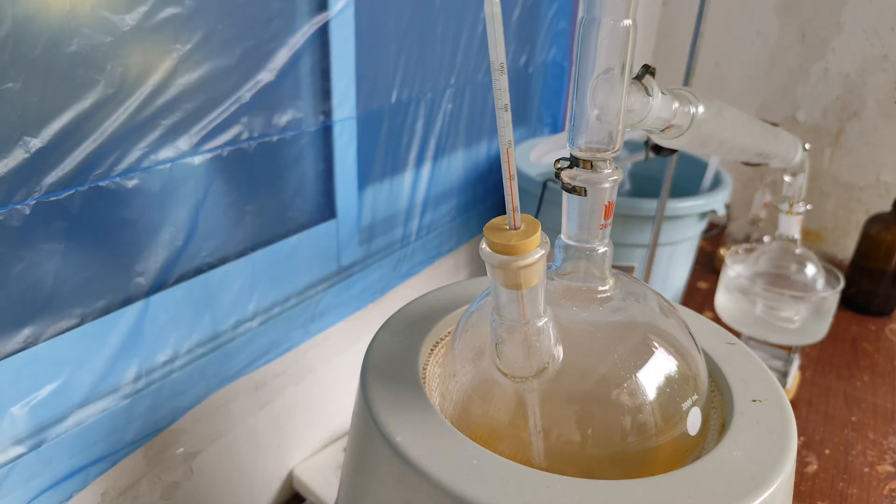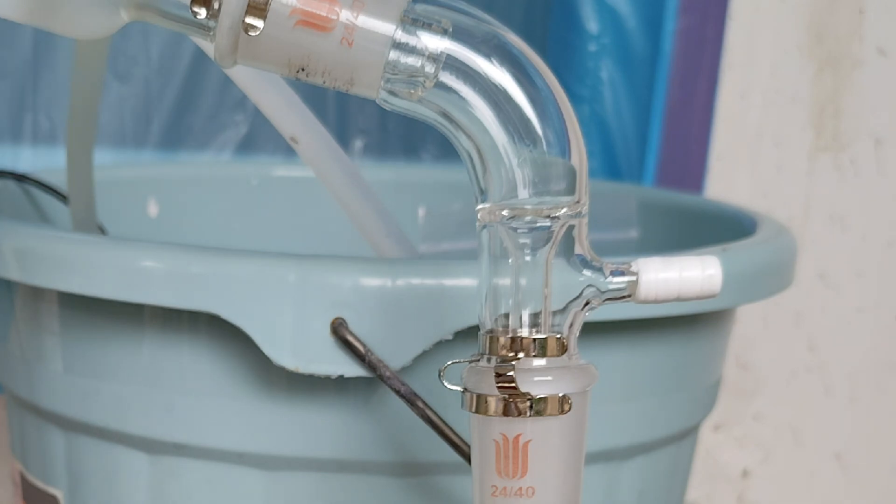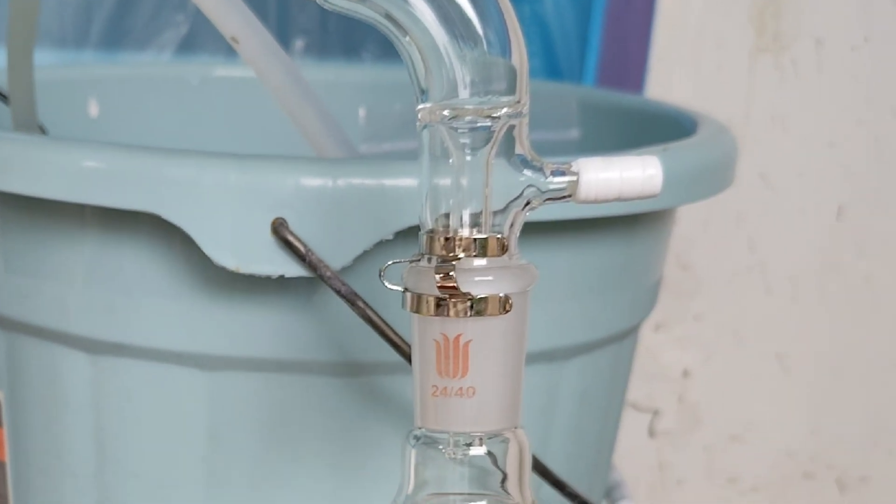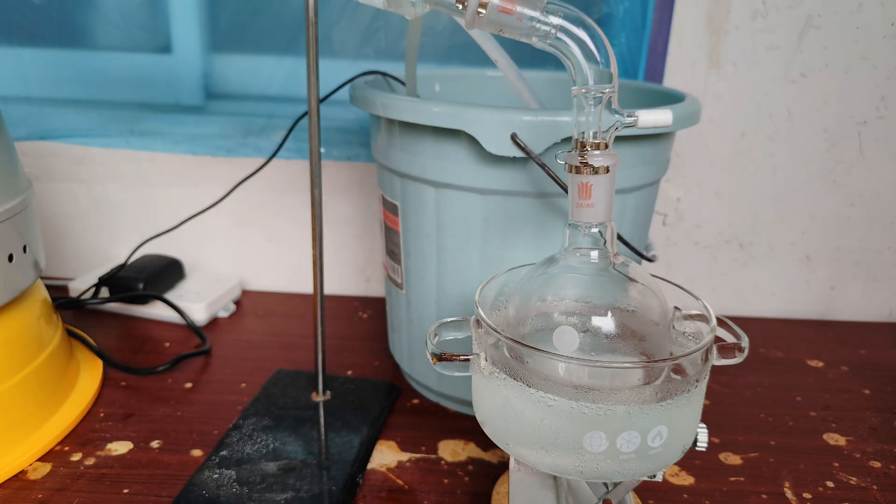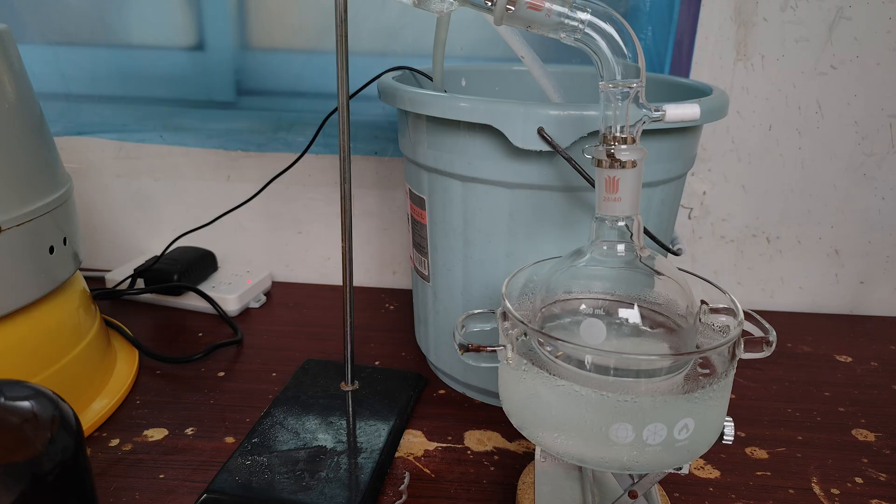The white foam in it is the diethyl vapor. As you can see, the liquid is slowly getting into the receiving flask. What I can do now is simply just wait.